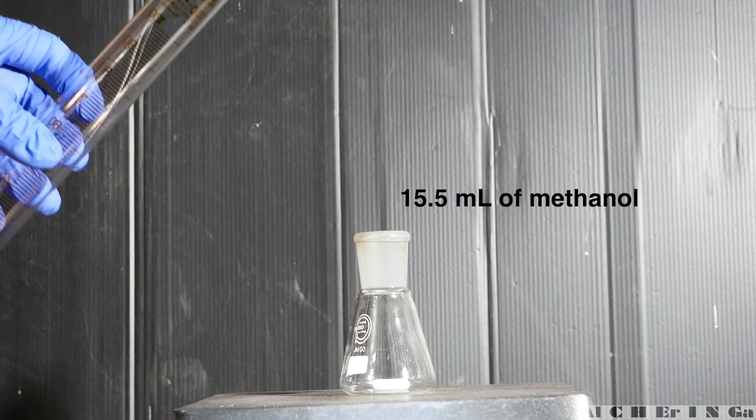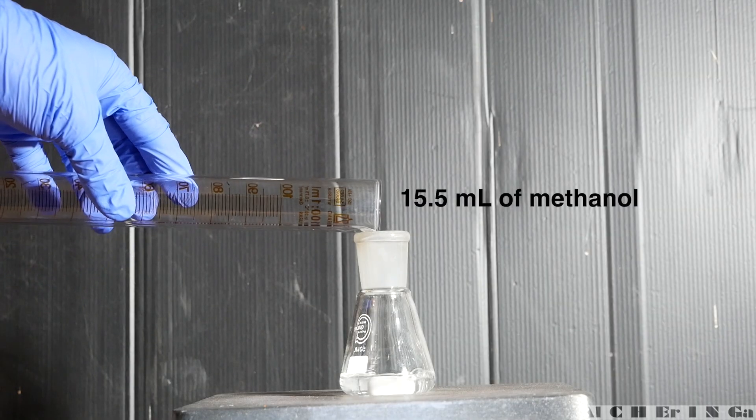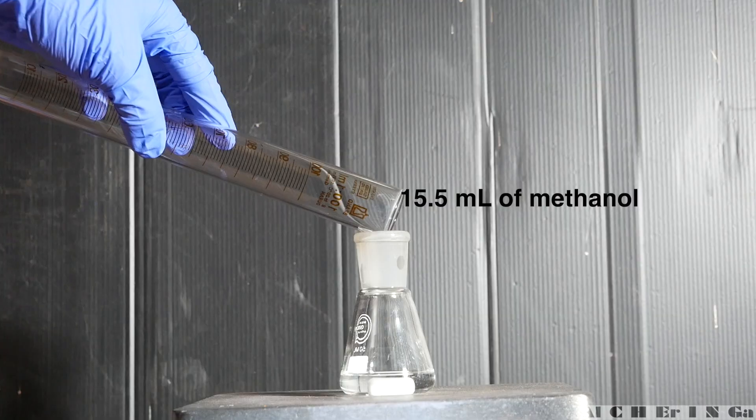To start the experiment, add 15.5 milliliters of methanol into a suitable glass container.